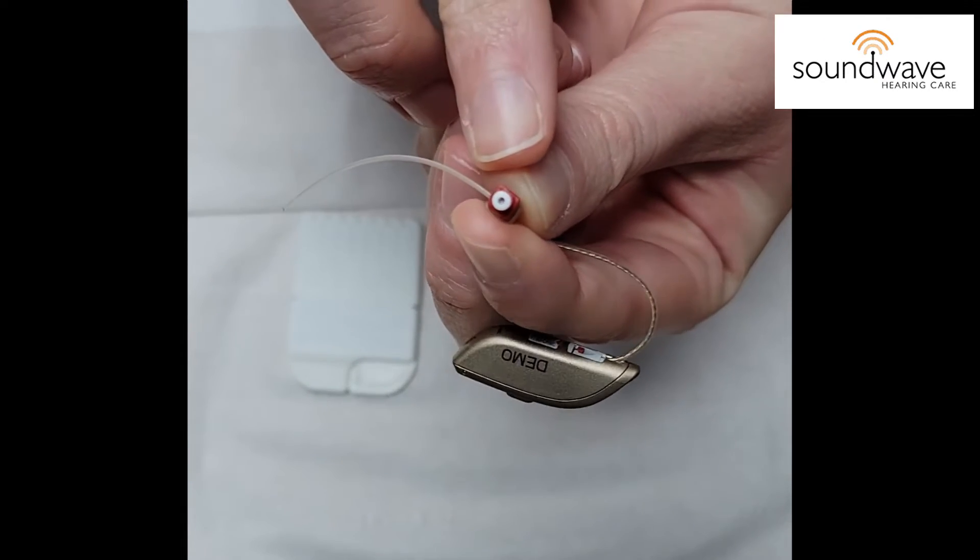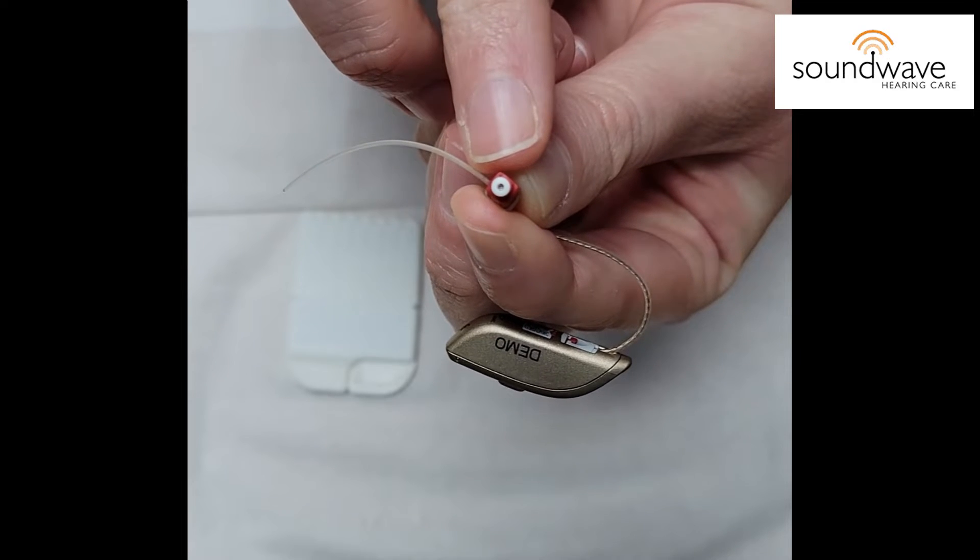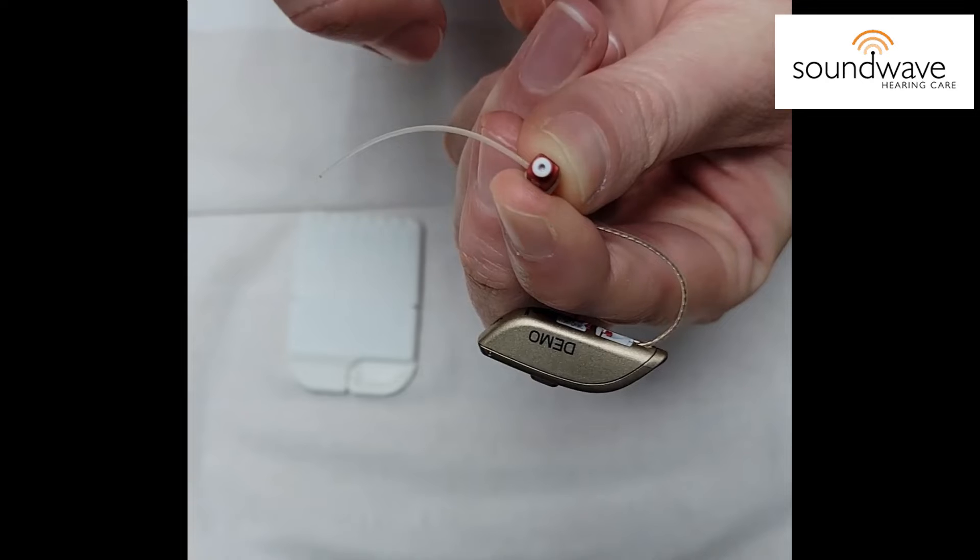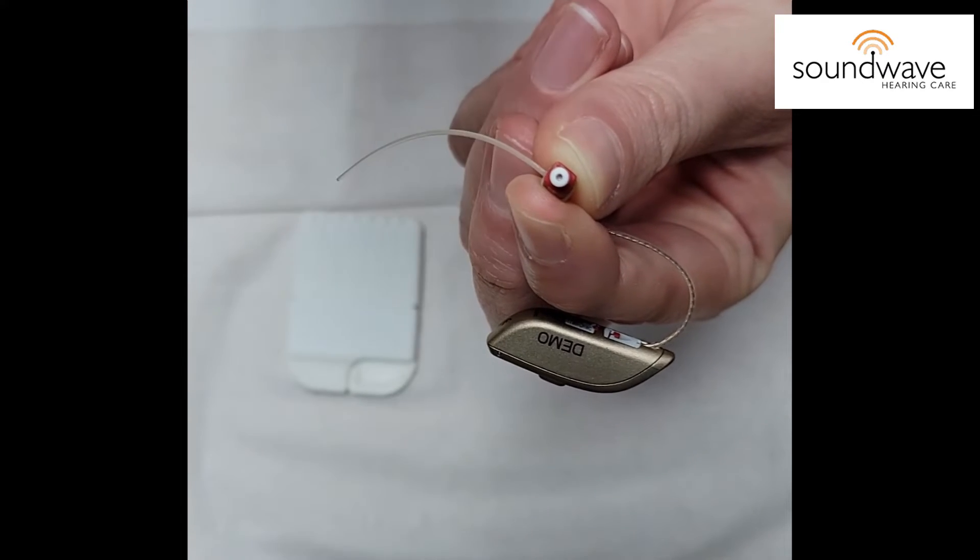As you can see we have exposed a little white wax filter. If there is a little bit of wax or moisture in there it will plug and prevent the sound from coming out.